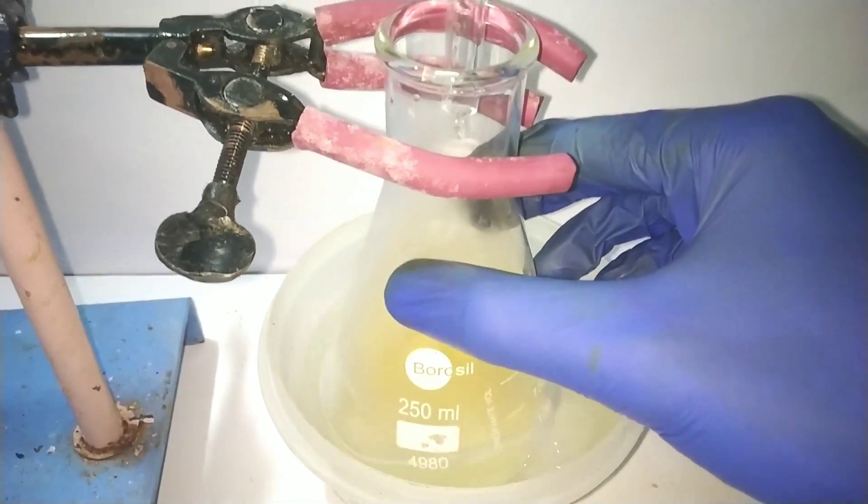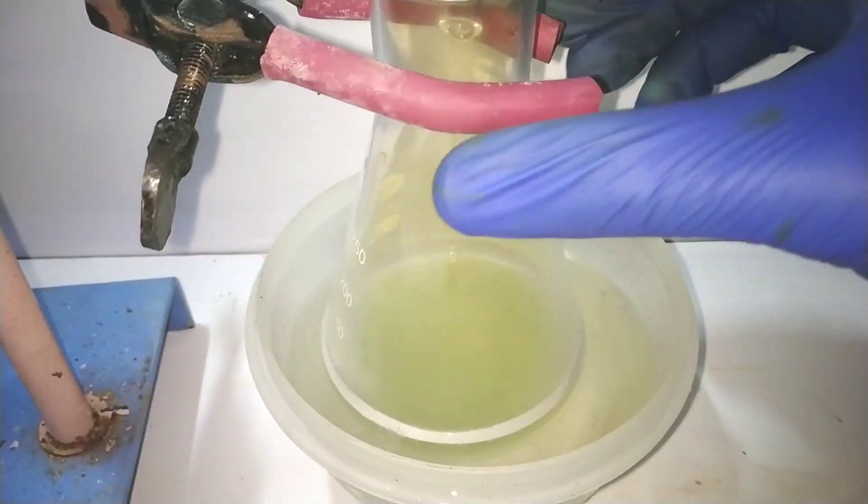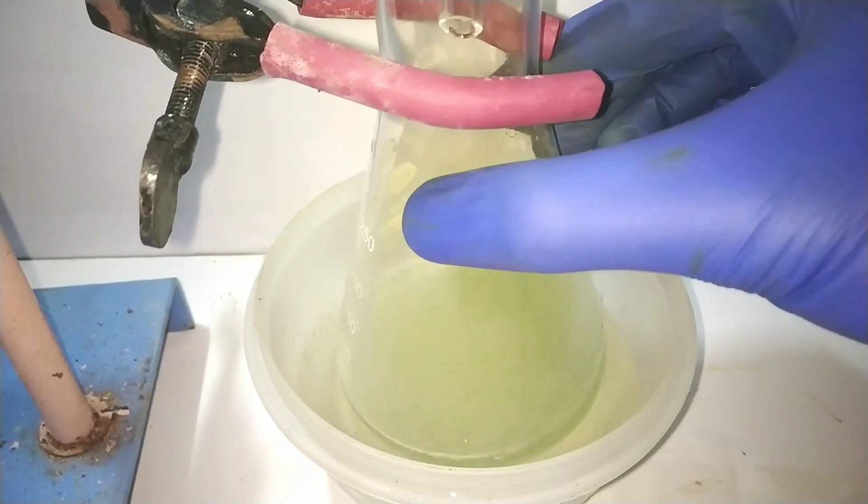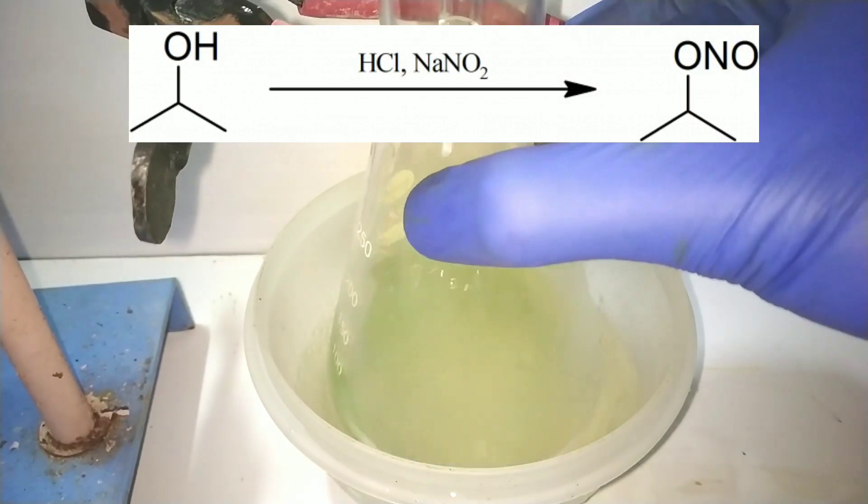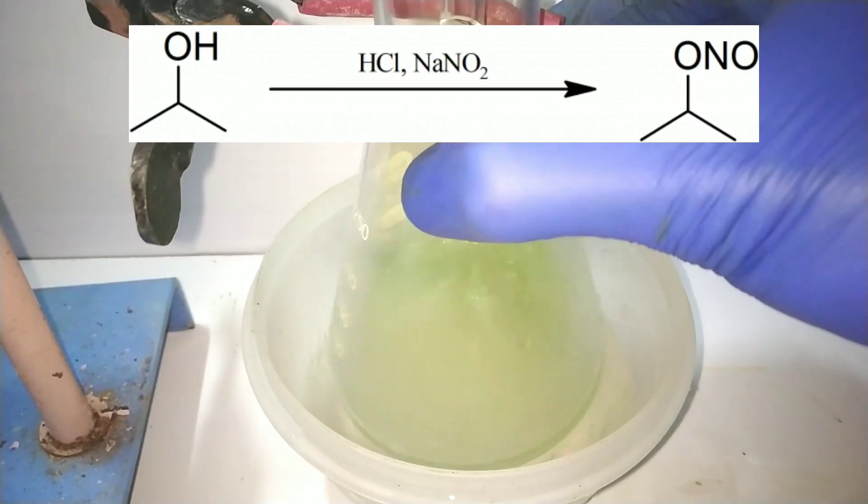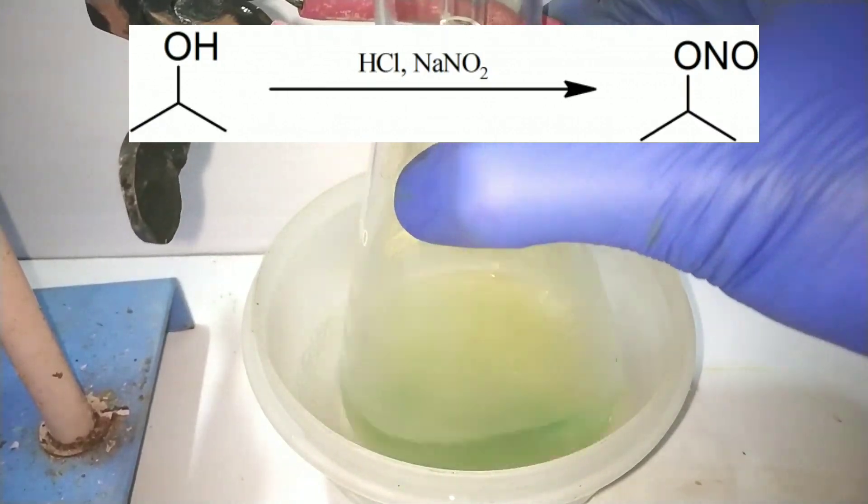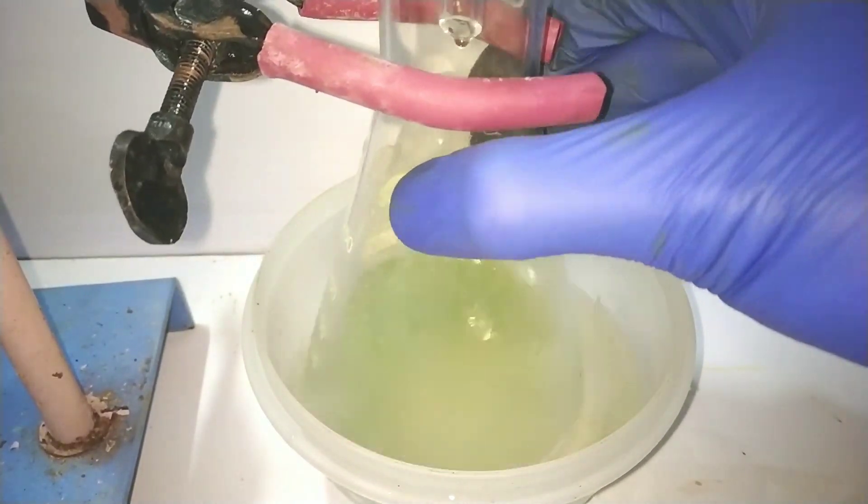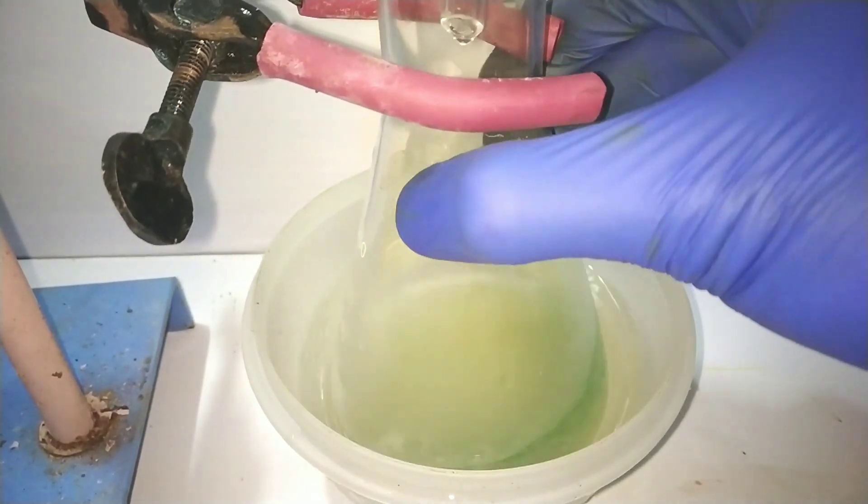See that there is formation of the brown colored nitrogen dioxide gas and the solution first becomes murky and a greenish tinge later appears. Isopropyl alcohol reacts with hydrochloric acid and sodium nitrite to form the isopropyl nitrite.